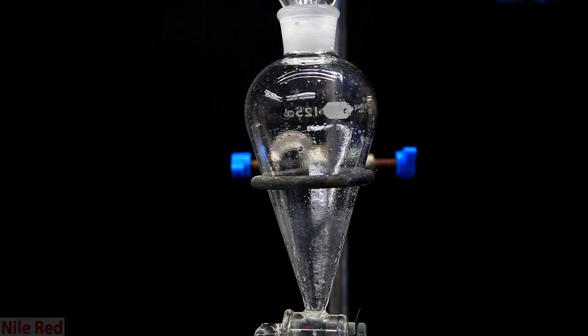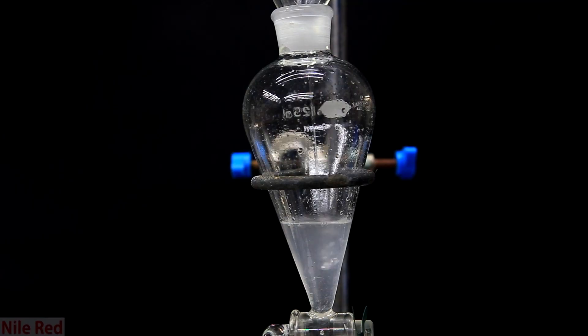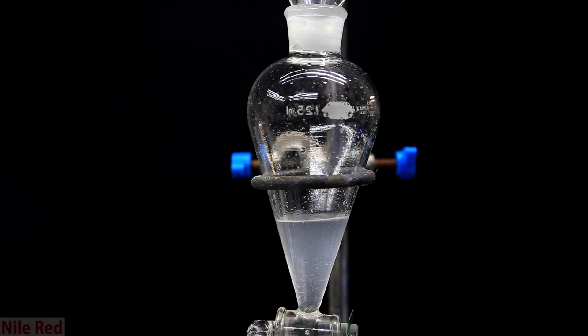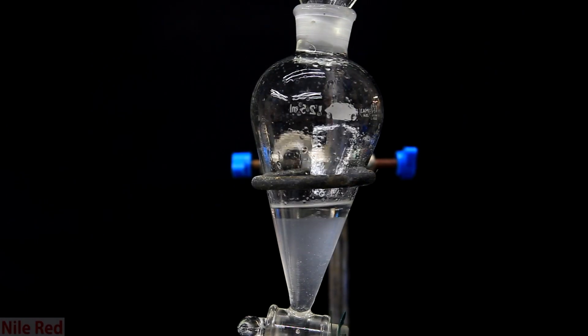The aqueous solution is then poured back into the separatory funnel so we can extract from it again. It's always good to carry out an extraction a few times because you don't get everything on the first time. So the procedure for this extraction is exactly the same as before.